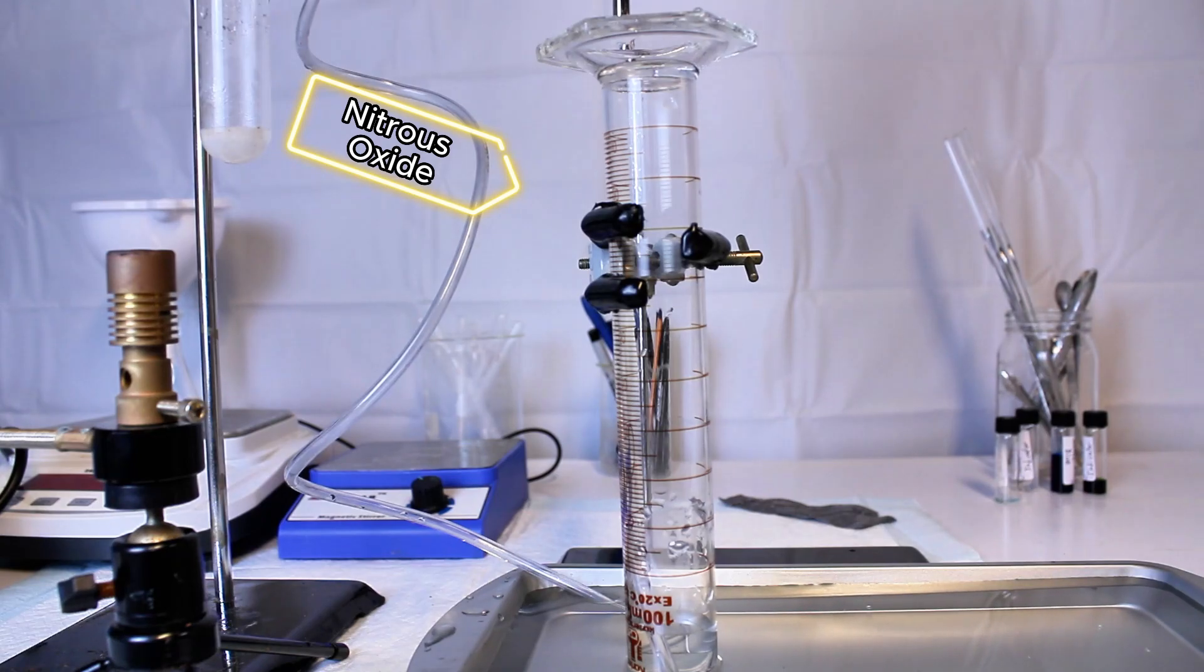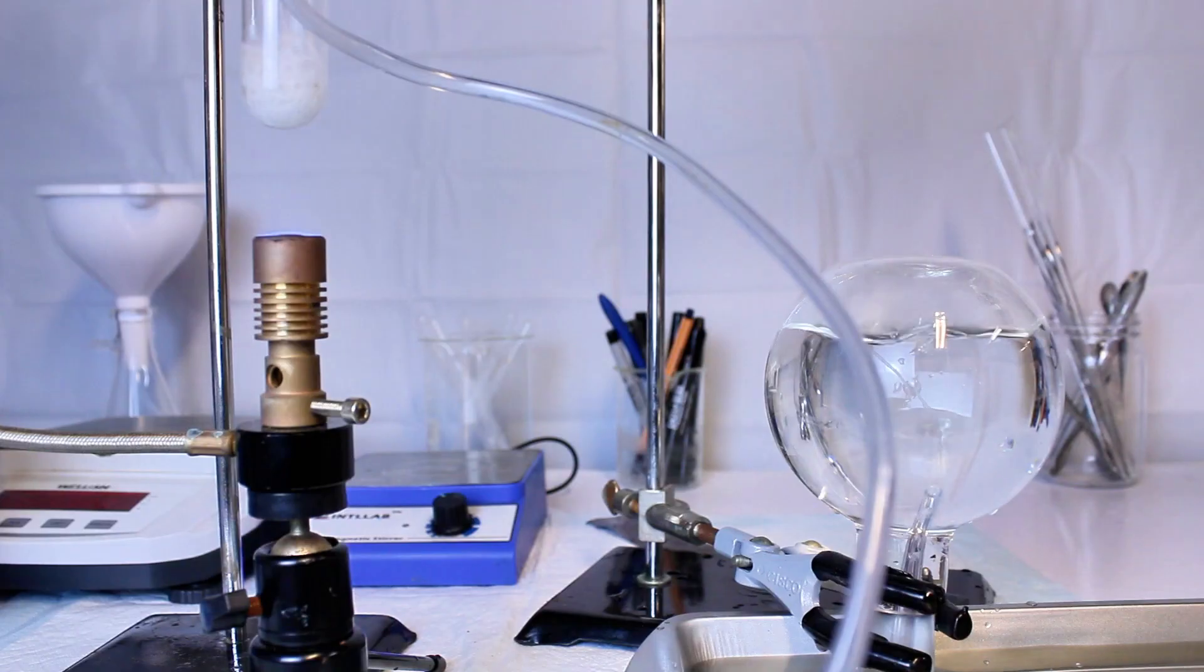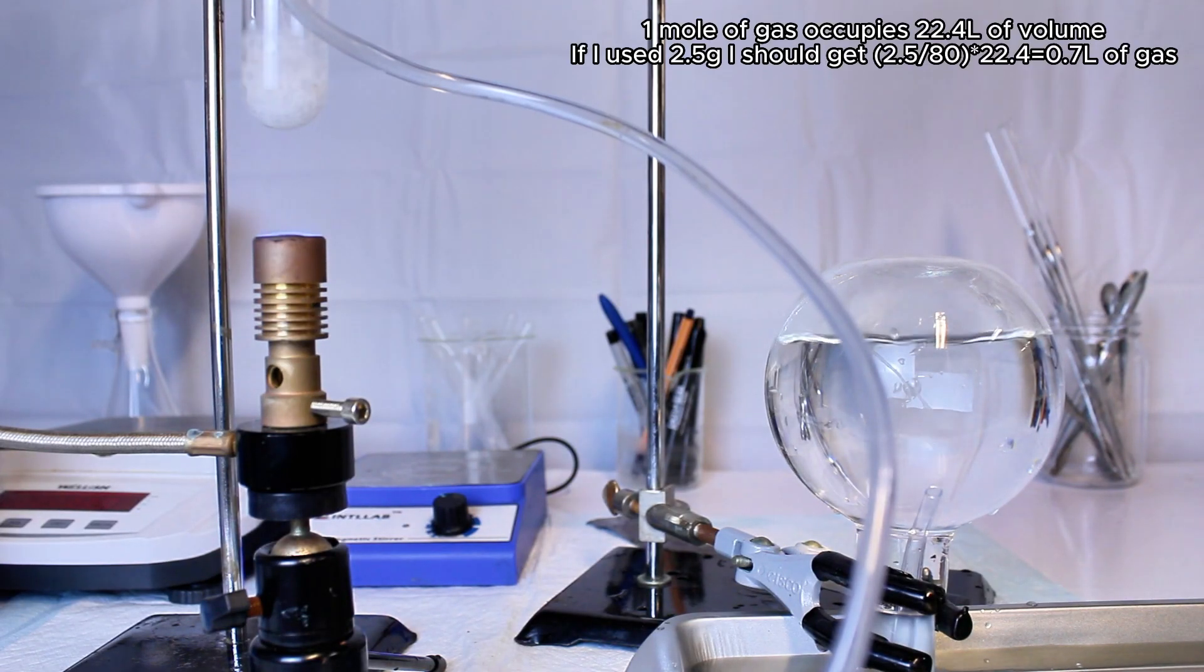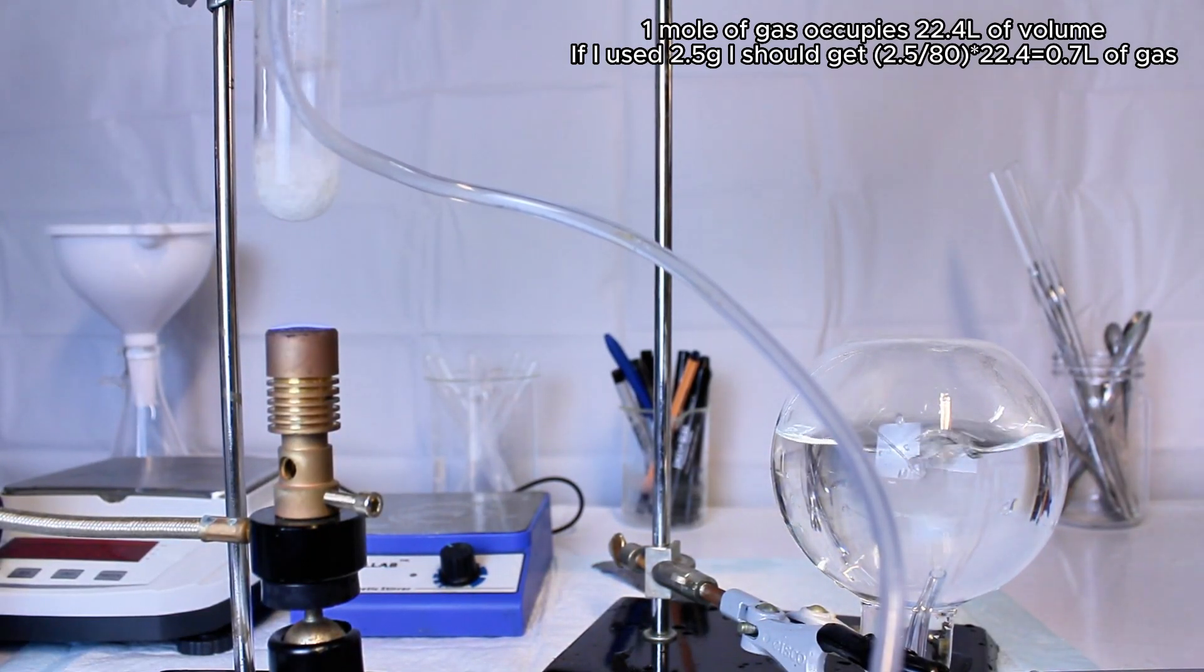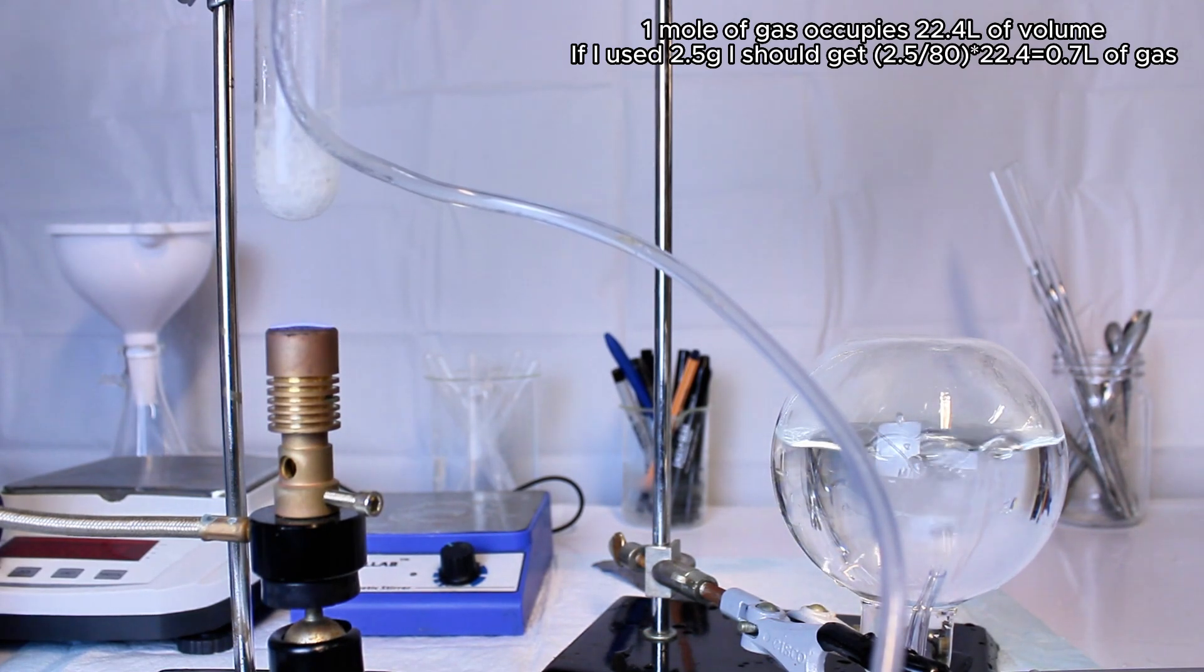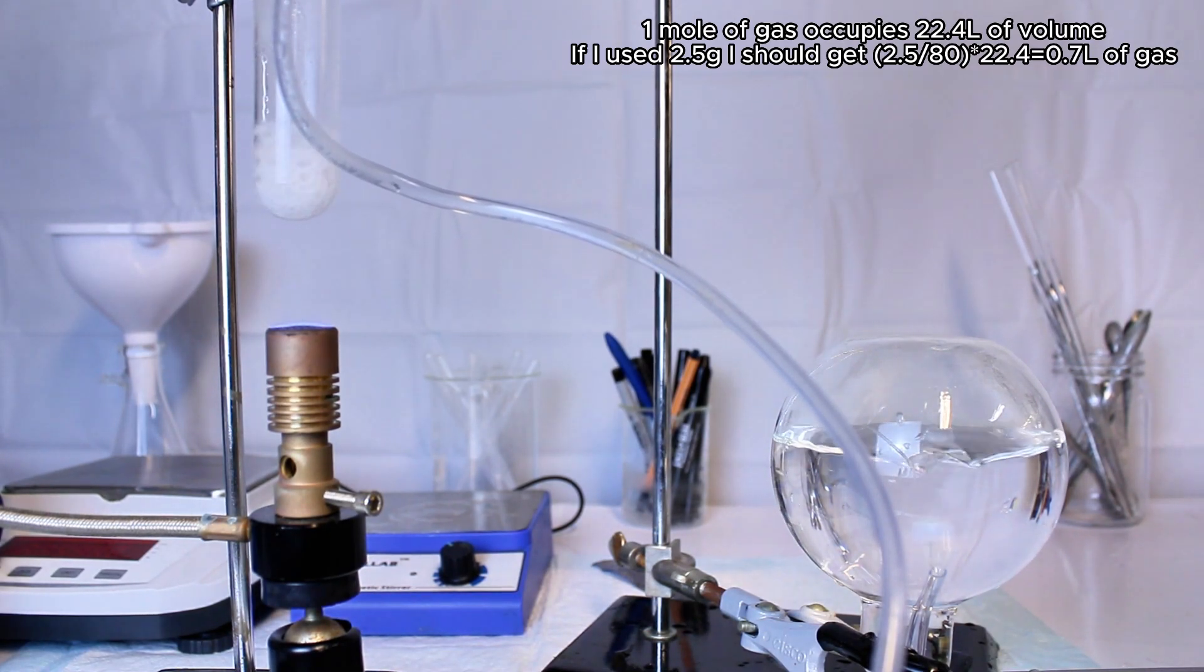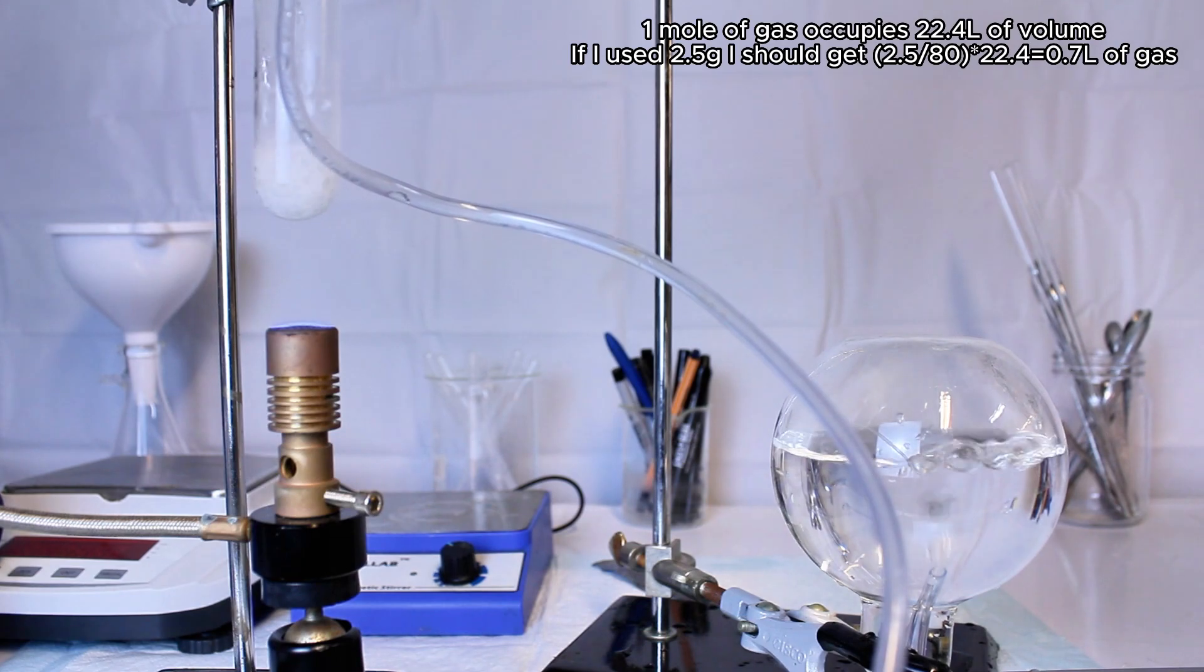In any case, that's the entire process, but I went ahead and set this back up with a 500ml boiling flask because I wanted to see how much gas this small amount of ammonium nitrate would make. As a side note, one mole of any gas will occupy 22.4 liters of volume, and so if I use 2.5 grams of ammonium nitrate, I could get around 0.7 liters of gas total.